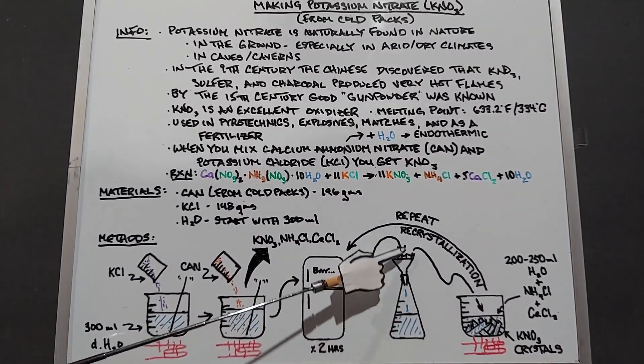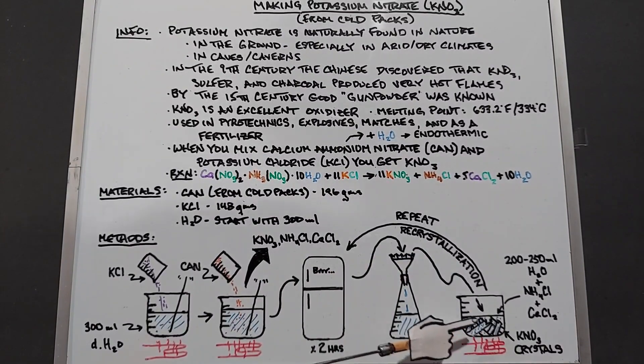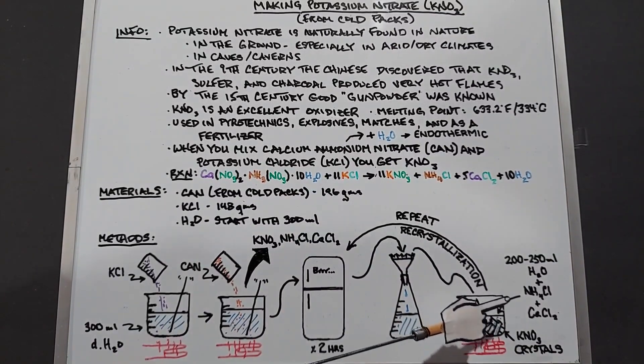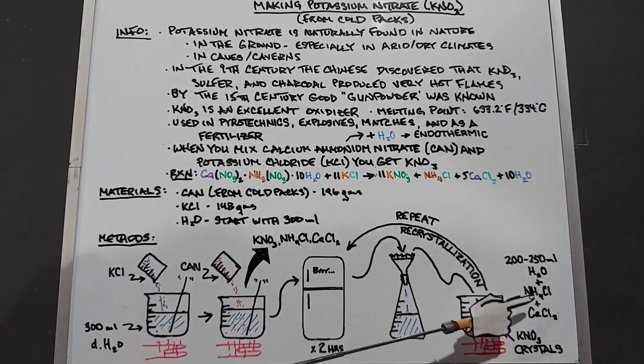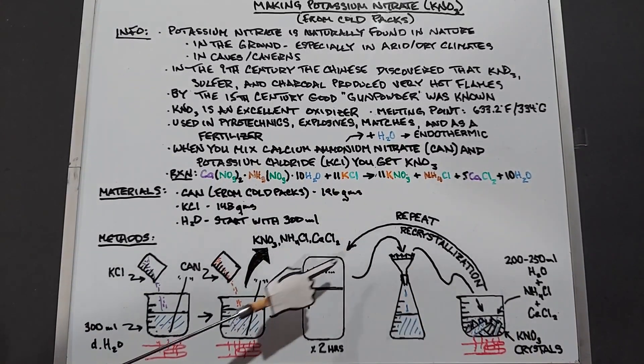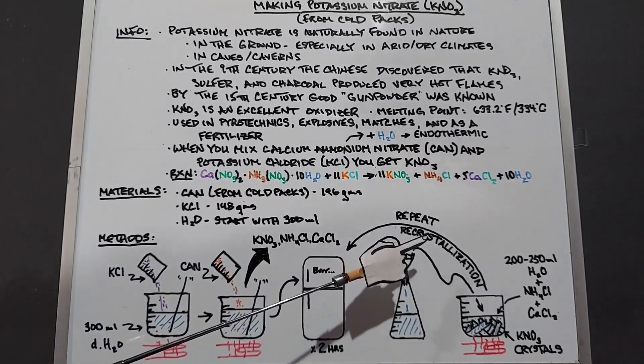You filter this, you take the solids from up here, mostly potassium nitrate, and re-dissolve it in water. I'm going to use between 200 to 250 milliliters this time. When you do that, you're going to have of course your potassium nitrate as the highest percentage and the ammonia chloride and calcium chloride as much lower percentages. So it's going back in the freezer, repeating this and doing a recrystallization.